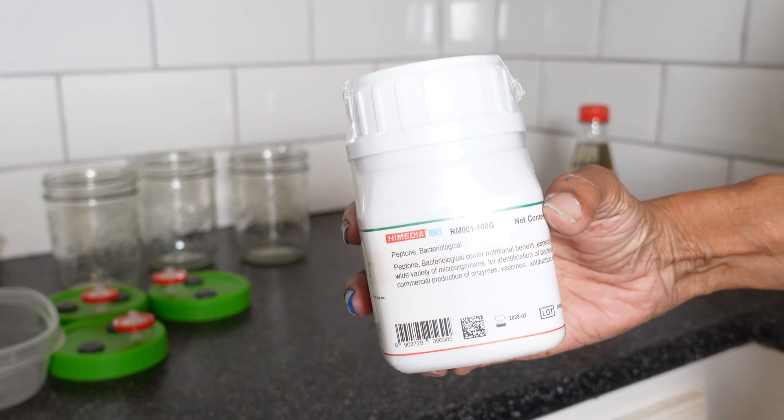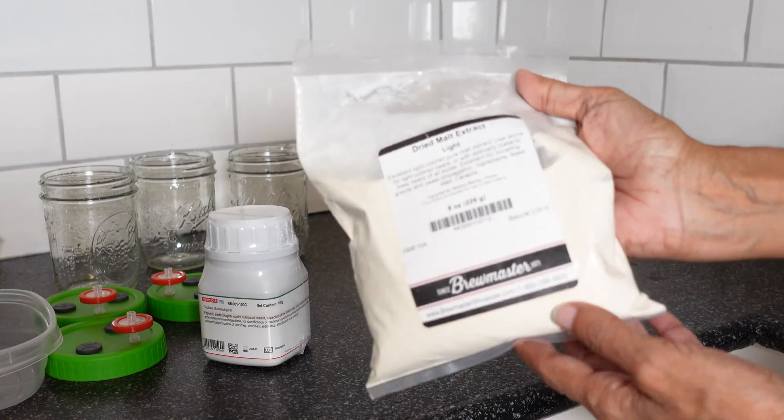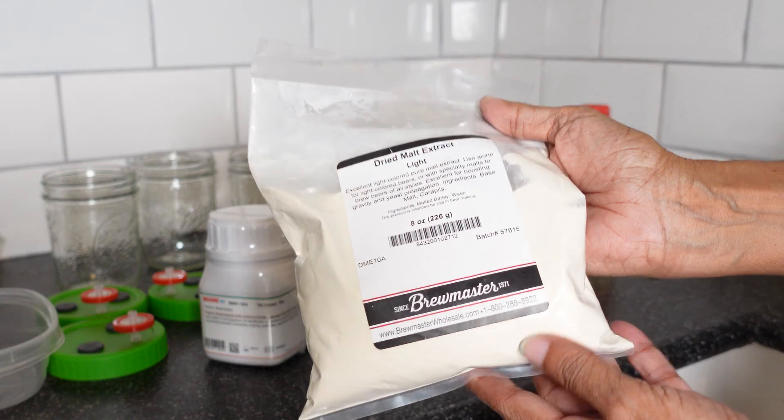For this recipe you will need peptone, light malt extract, and some corn syrup.